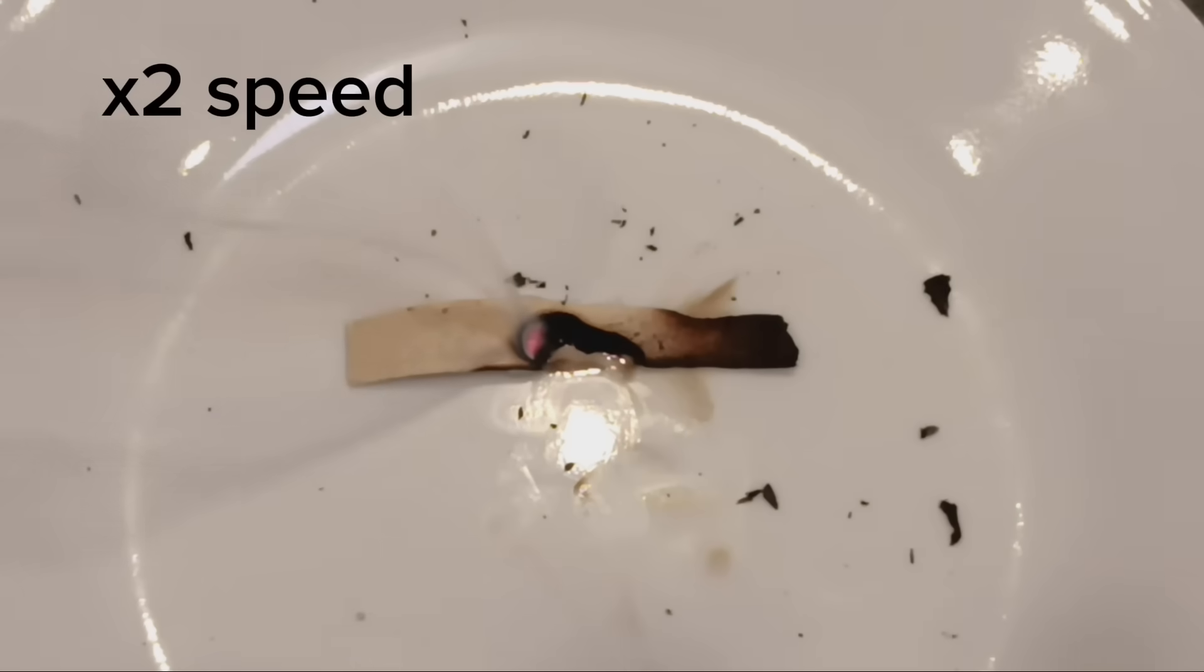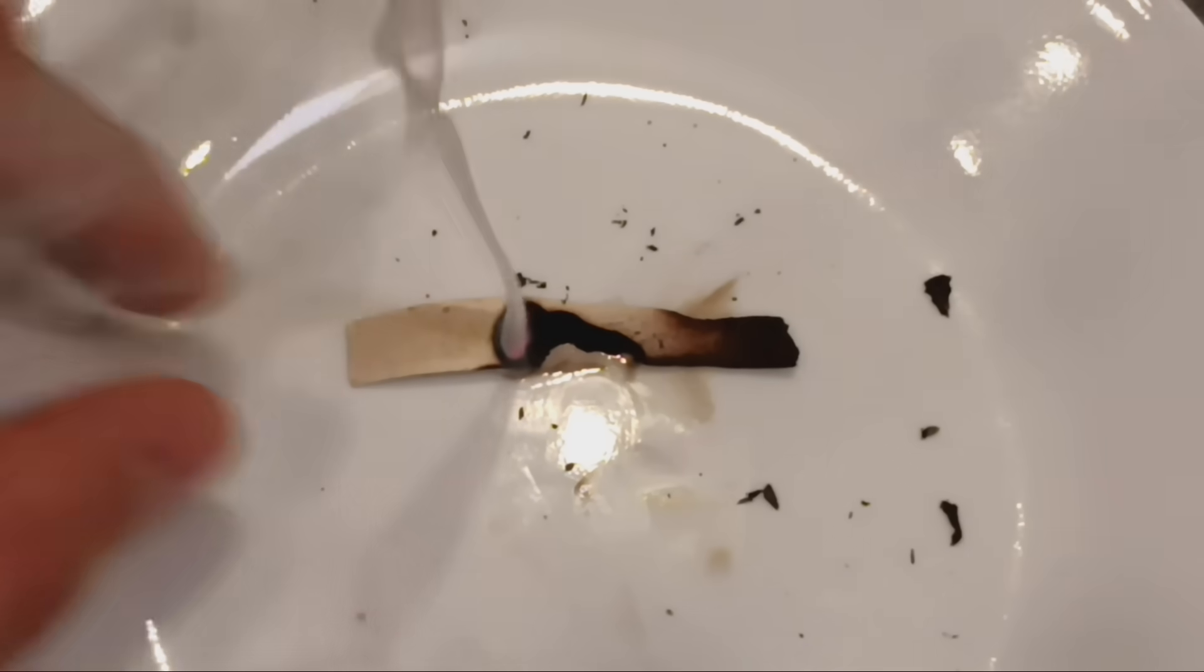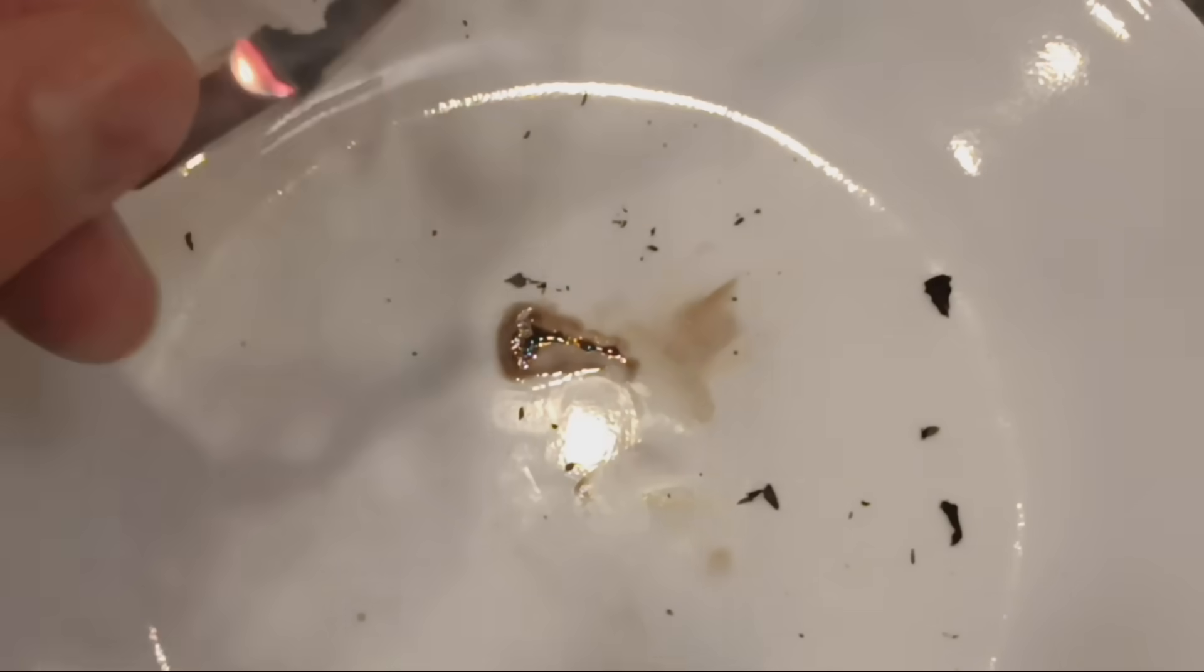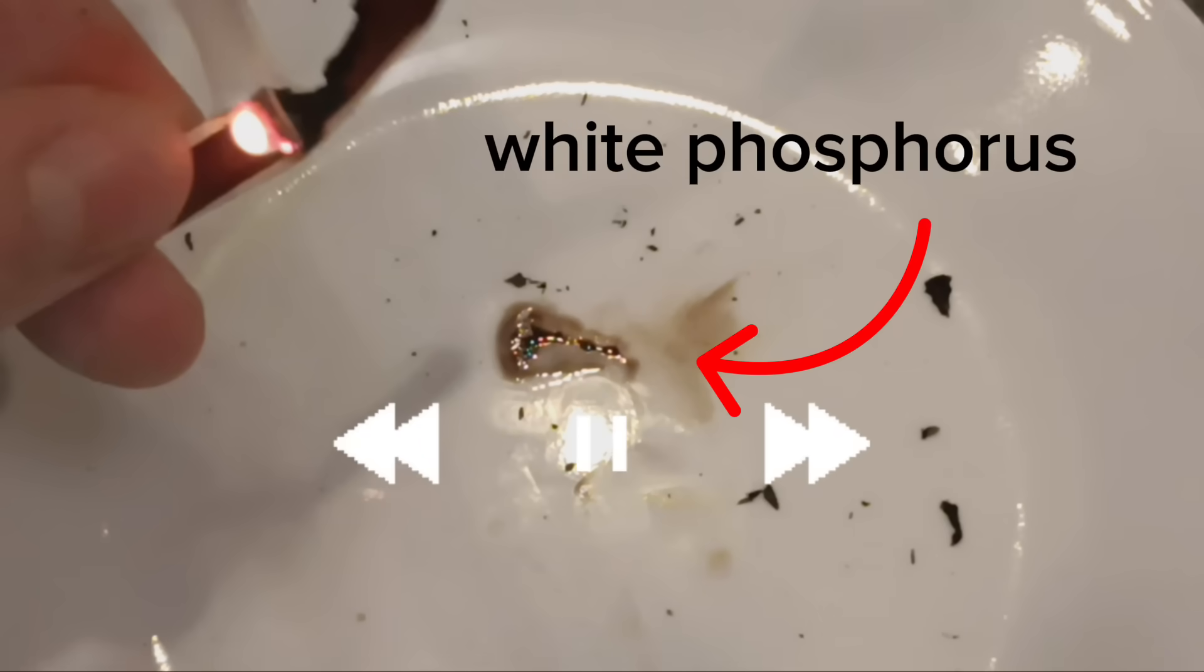My best guess is when it burns, it evaporates and then it gets condensed on the cool ceramic plate. What's left over right here is my white phosphorus.